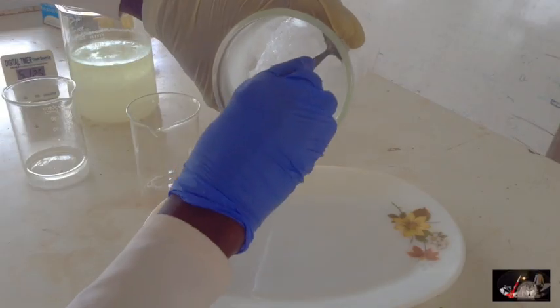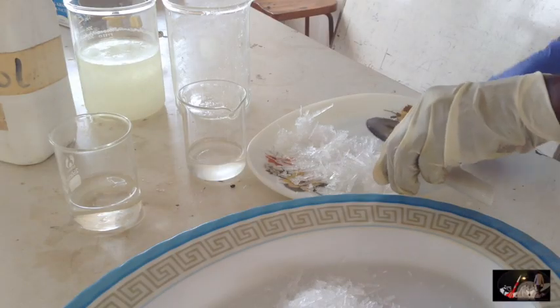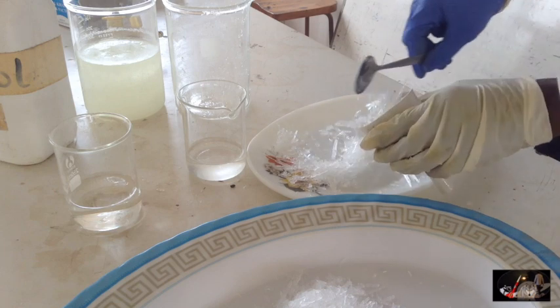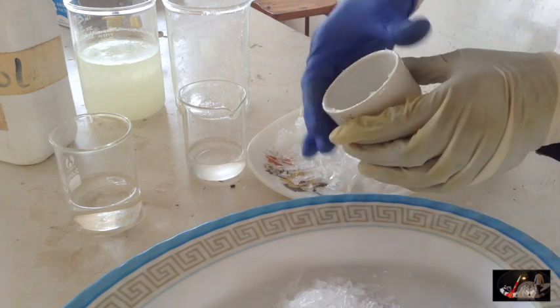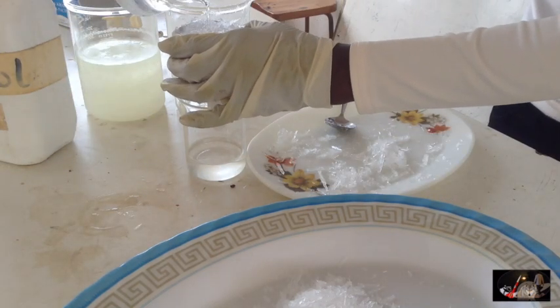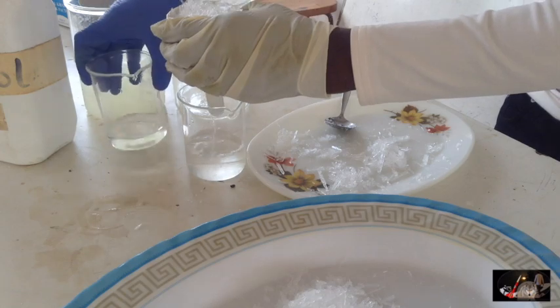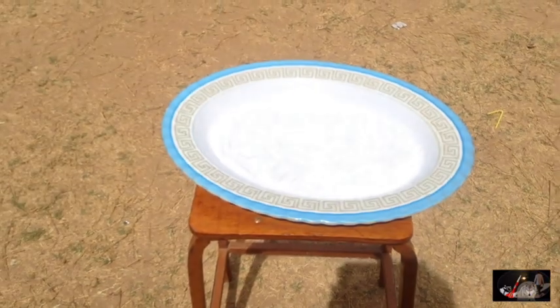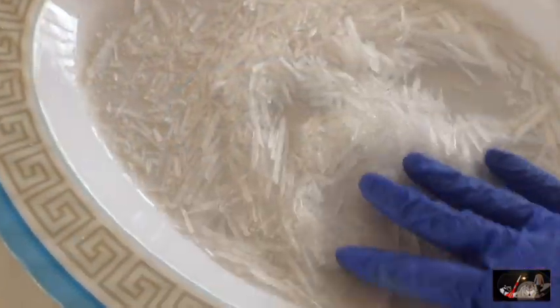Now you have to wash the crystals using ethanol. For that, I place the crystals inside the Buchner funnel and spread ethanol on top so that it seeps through as it gets expelled below. After which, you can dry the salt. I'm using the sun to complete that process. This is the final result of your homemade KNO3.